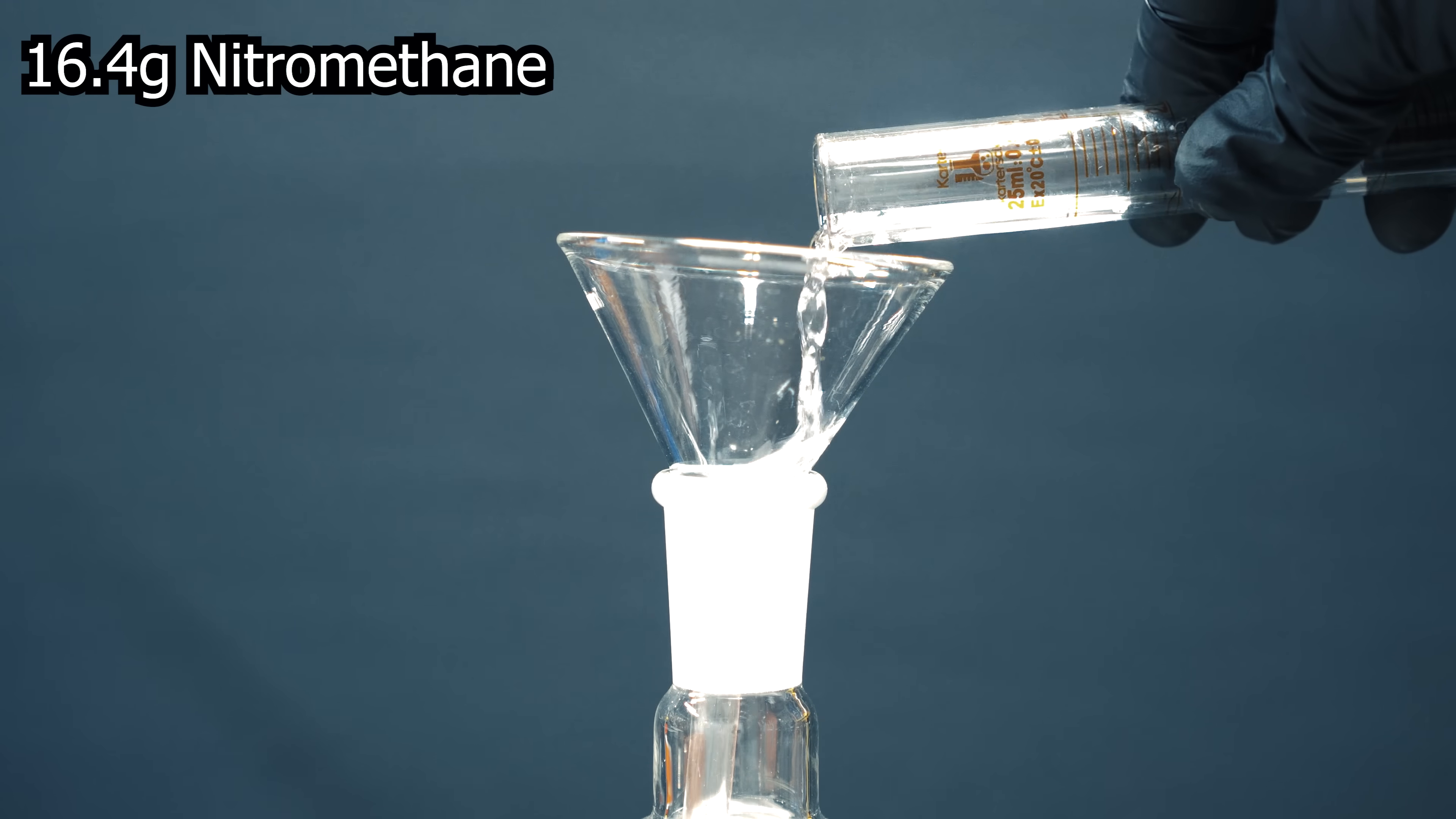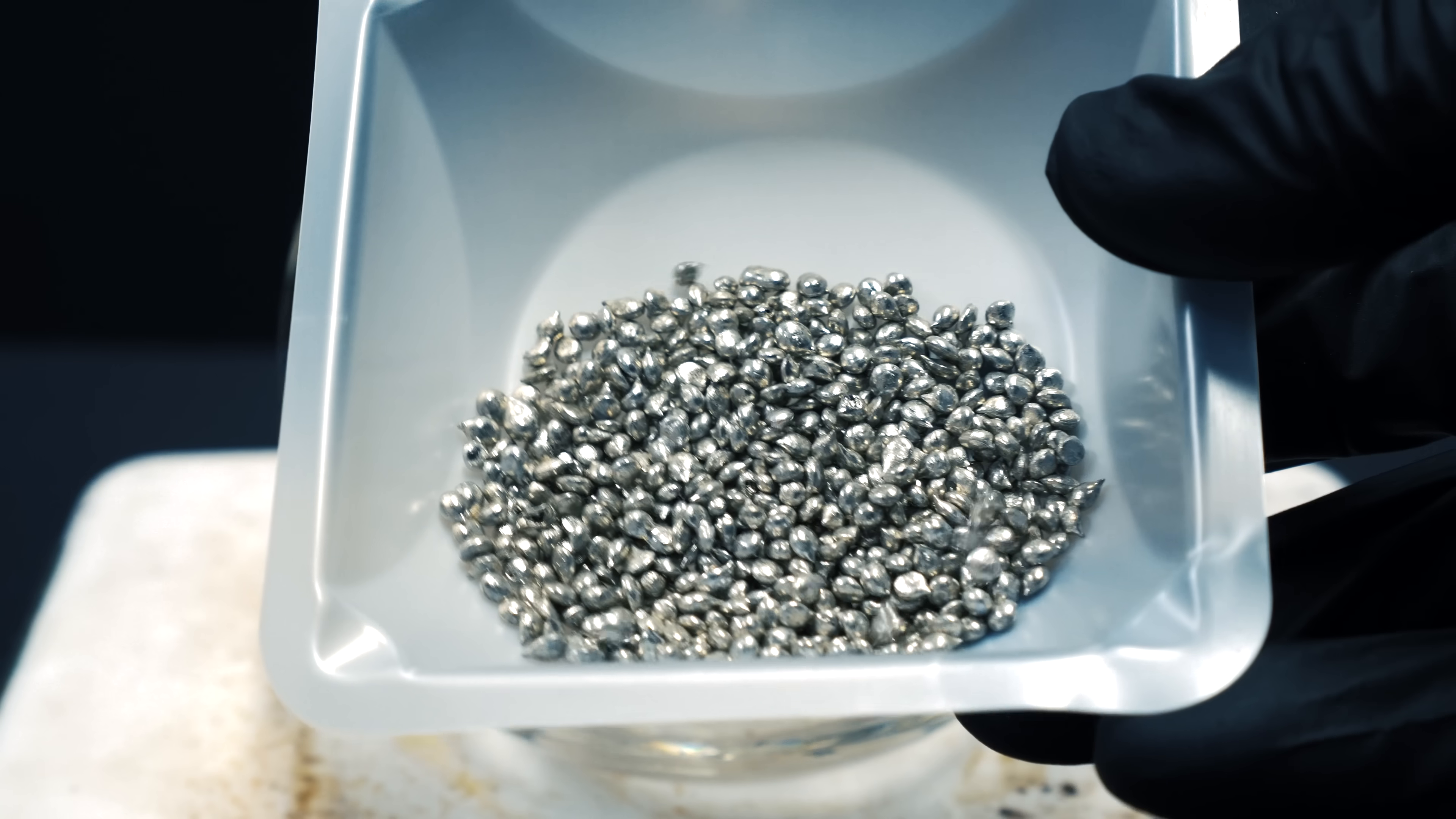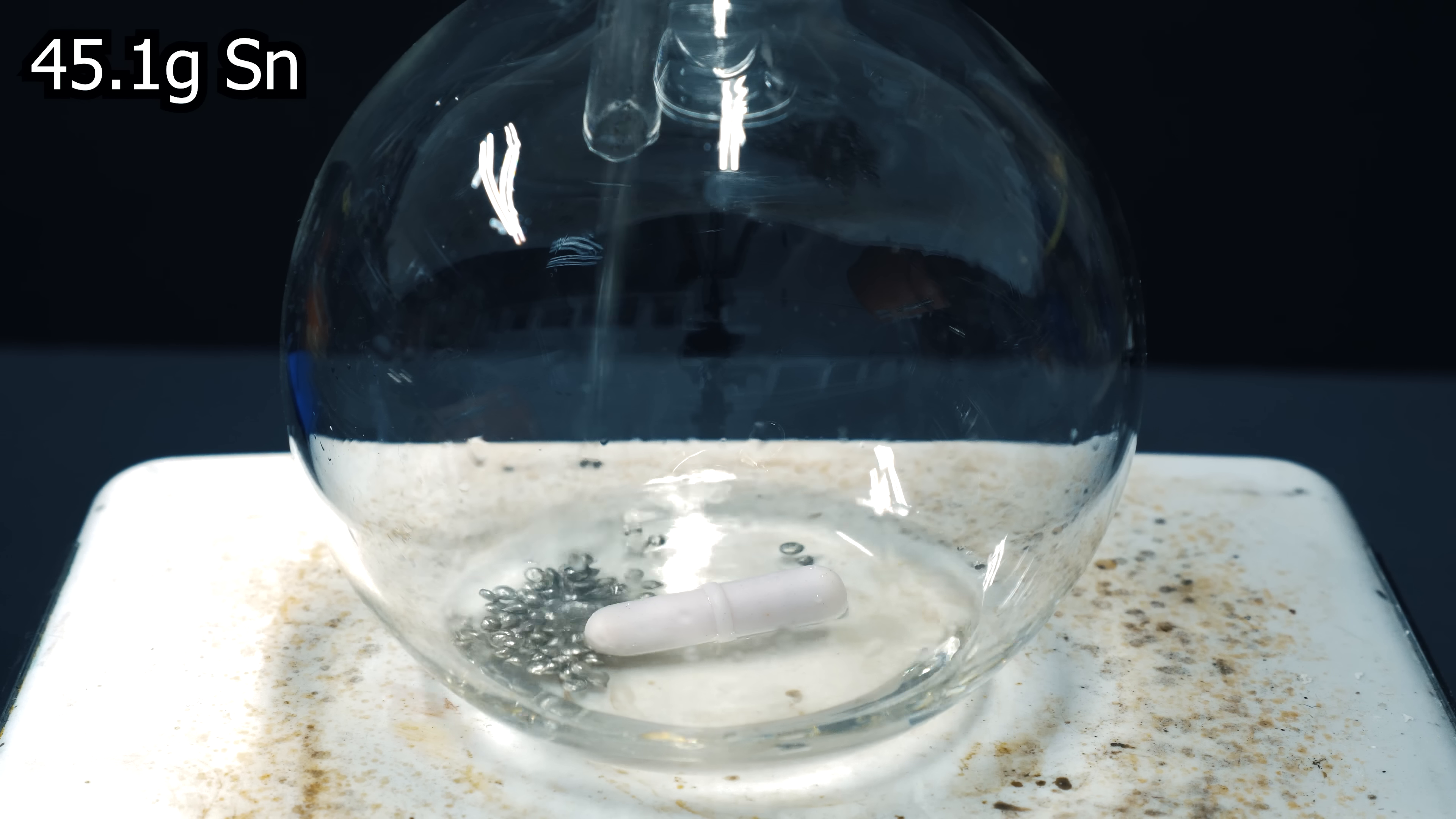I added 16.4g of nitromethane that I made from my previous video. Like I said before, we're going to be using tin as our metal source. The reason I went with tin is this procedure only calls for about an hour of refluxing, whereas the iron would take about 14 hours.